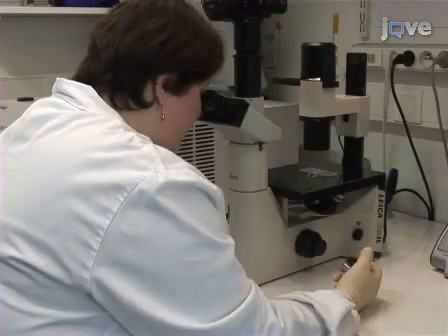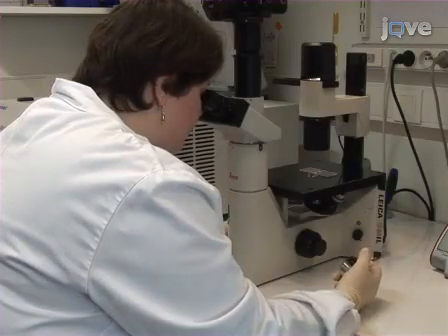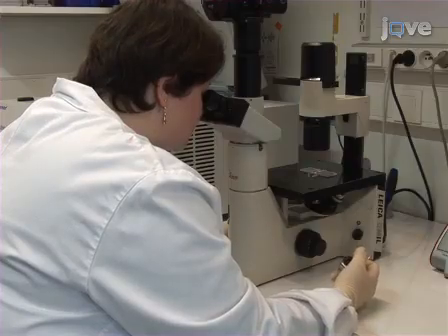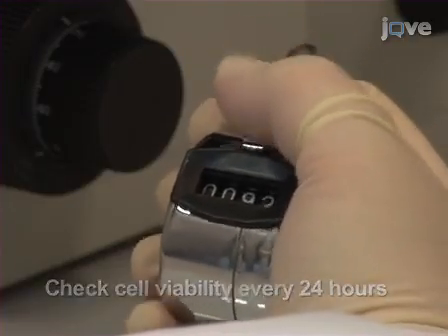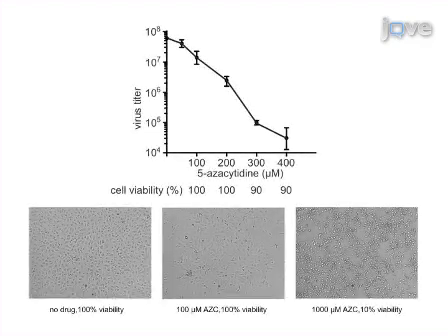Then, every 24 hours for the next 2 to 7 days, use 1 plate of cells to check viability by trypan blue exclusion using a hemocytometer. Calculate the percentage of viable cells for each concentration of mutagen, including the untreated control. Conditions that result in less than 50% cell death by the infection endpoint when maximum titers are reached are ideal.